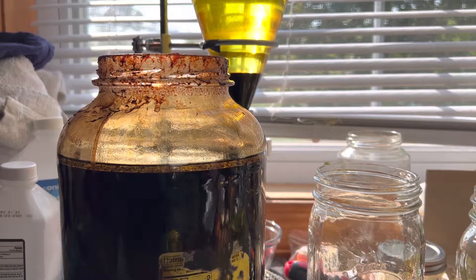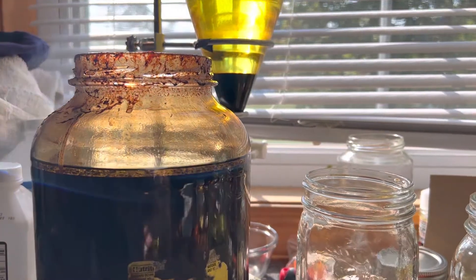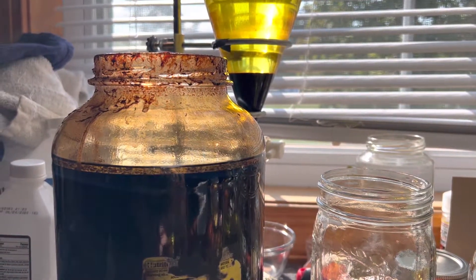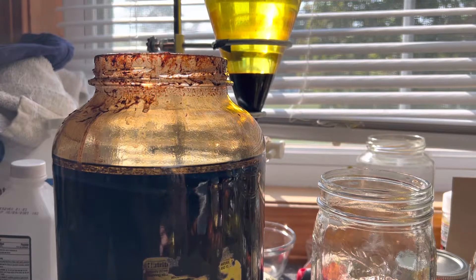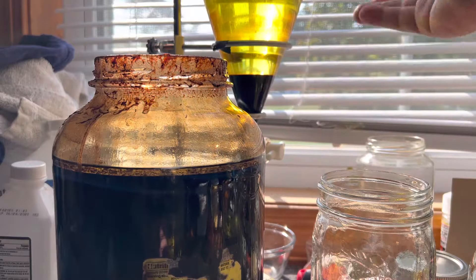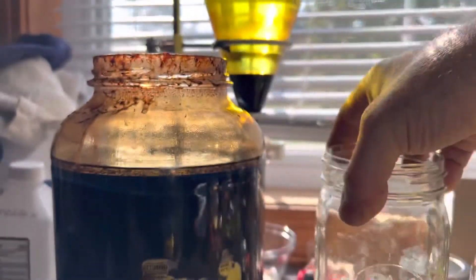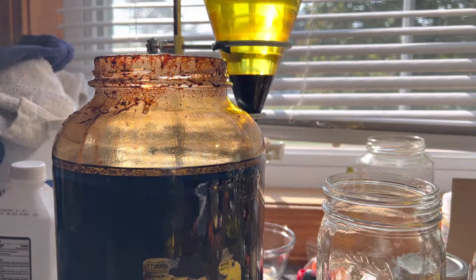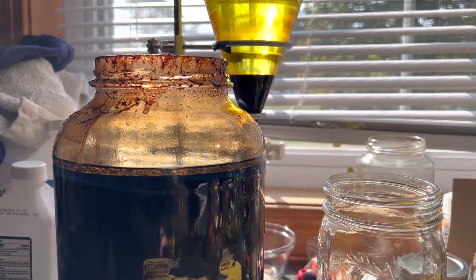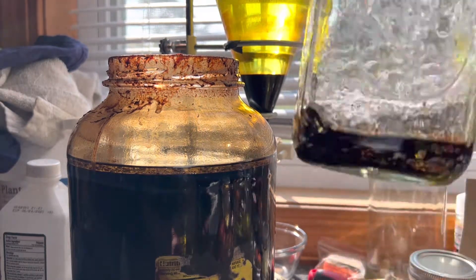That's one way you can get a little separation out of it. Another way is to get yourself a separatory funnel, but I've found that separatory funnels are almost a waste of time, honestly. Even though you separate it, there's always something mixed in the middle and you always end up with the same jar of the same thing. This will probably not save you anything — don't worry about getting one of those. I have not found a significant use for it. What I just showed you is a great way to do it.